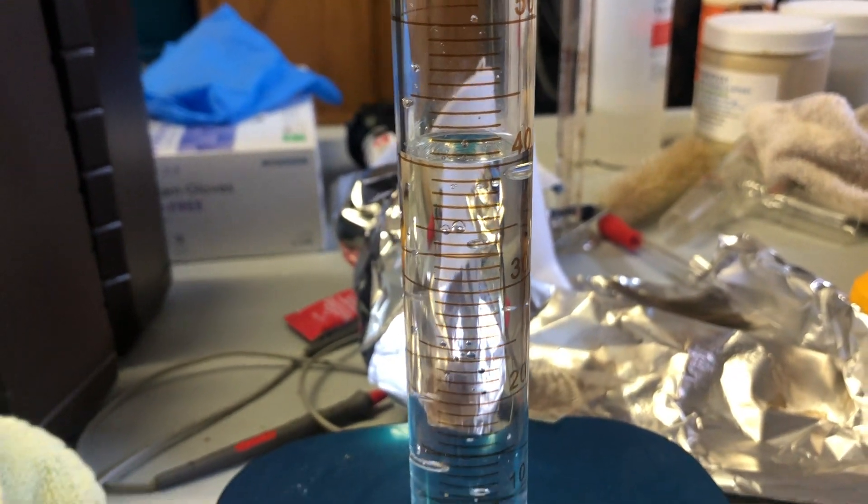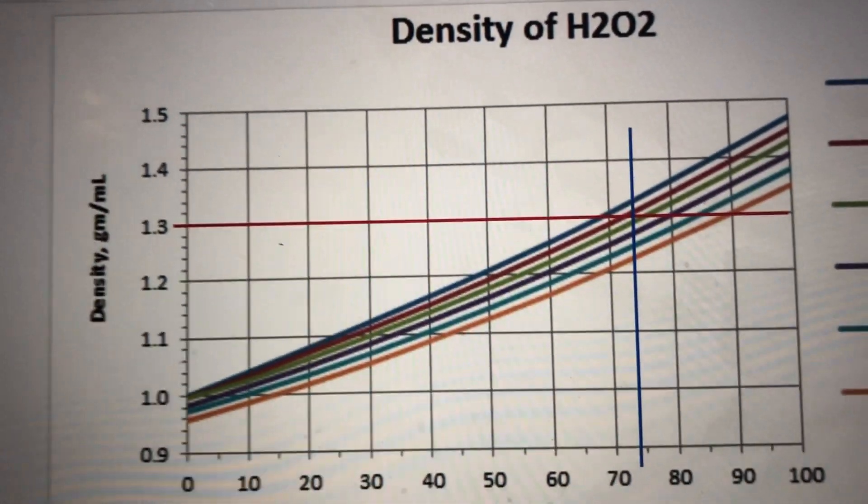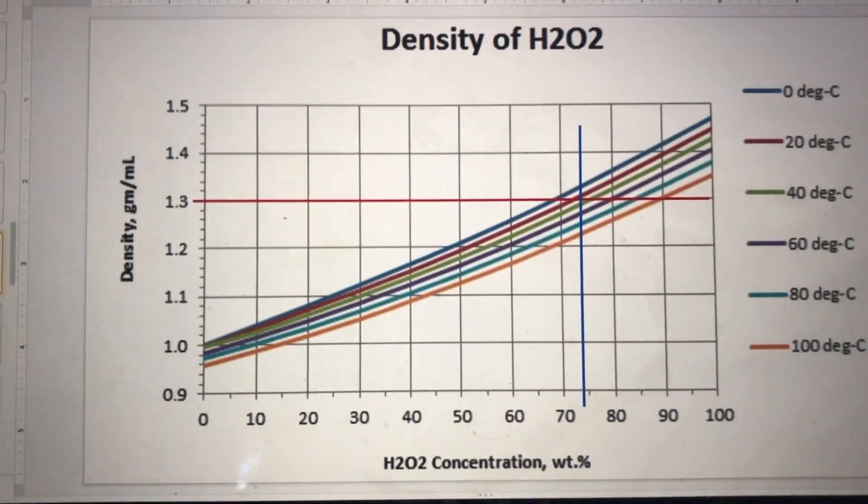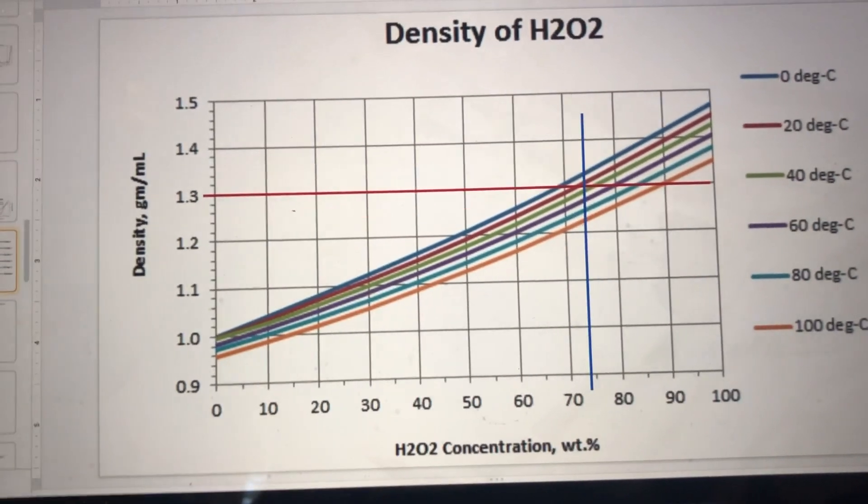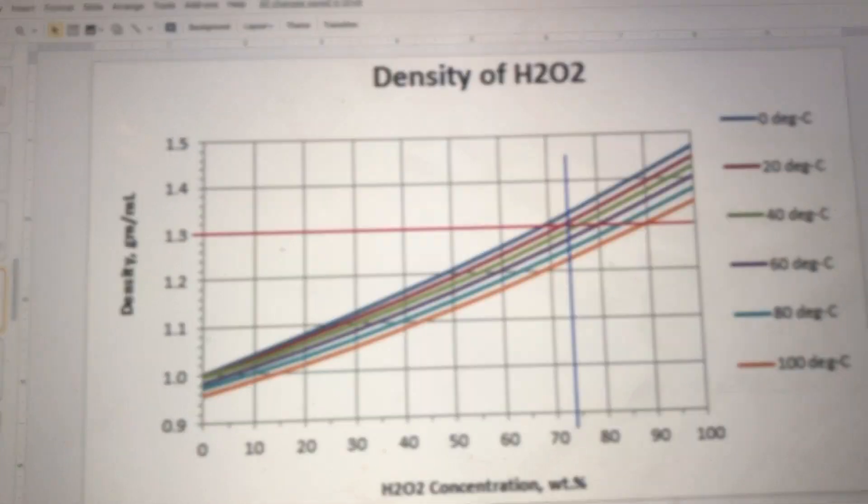The weight of about 40.1 milliliters is 52 grams. Which is a ratio of 1.3. So looking at it, we're about 74%. So well on our way to getting to 90. I'm gonna just put it back in the distiller and go for about another hour.